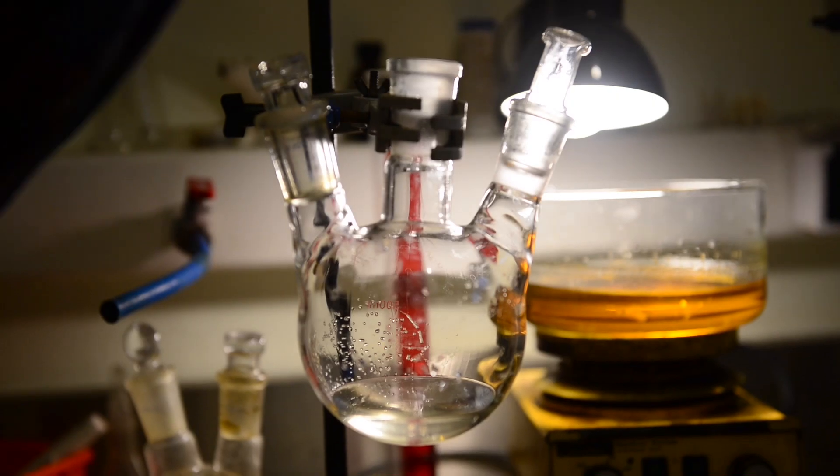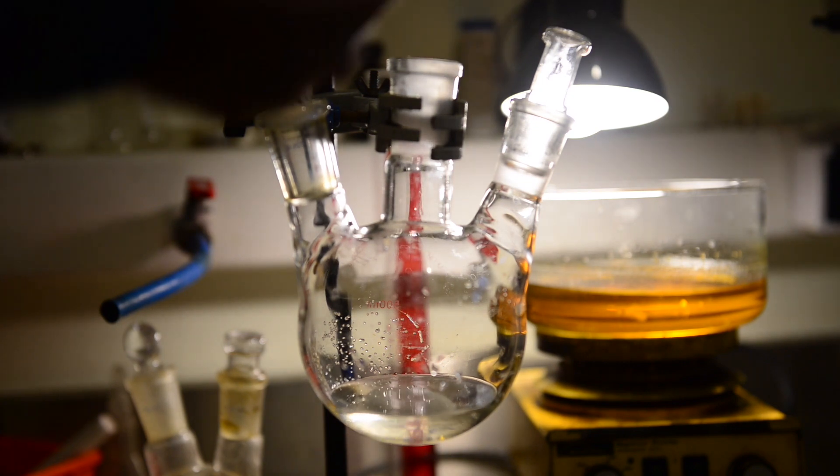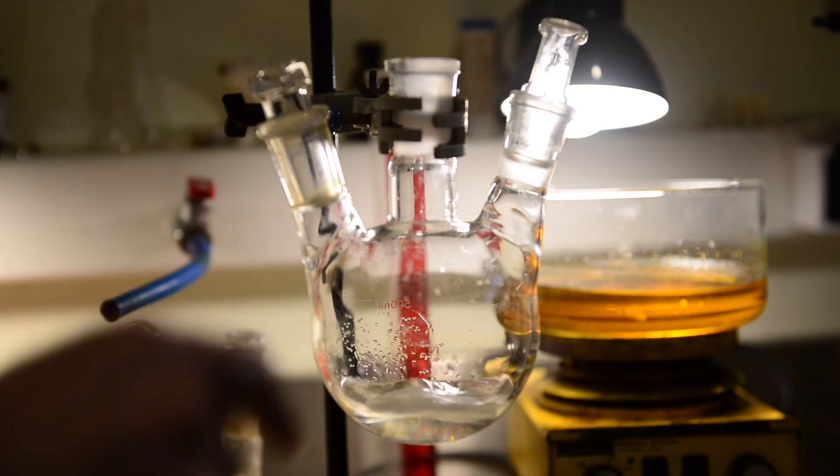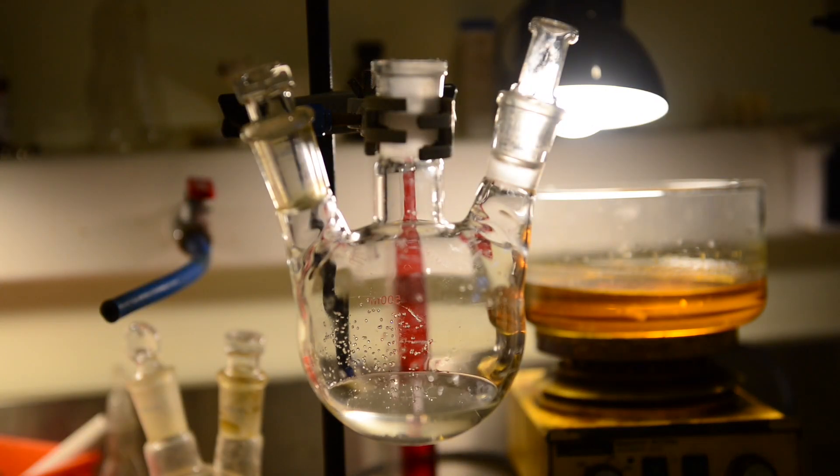After finishing the distillation, we are diluting the distilled product with diethyl ether. We are placing the solid sodium hydroxide to the solution. The product must be stored for 3 hours on the solid sodium hydroxide. This time no blue coloration has been observed.